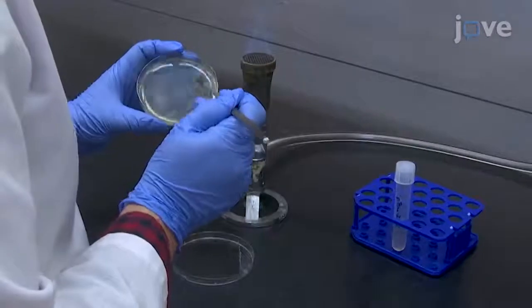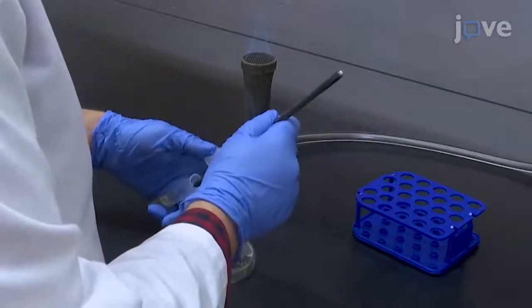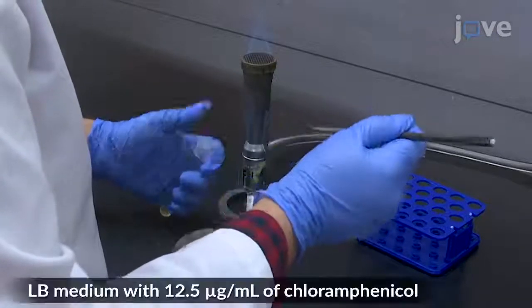First, grow a single colony of E. coli DH10B carrying the BAC Zika virus infectious clone in 5 ml of LB medium containing chloramphenicol for 8 hours at 37 degrees Celsius with gentle shaking.